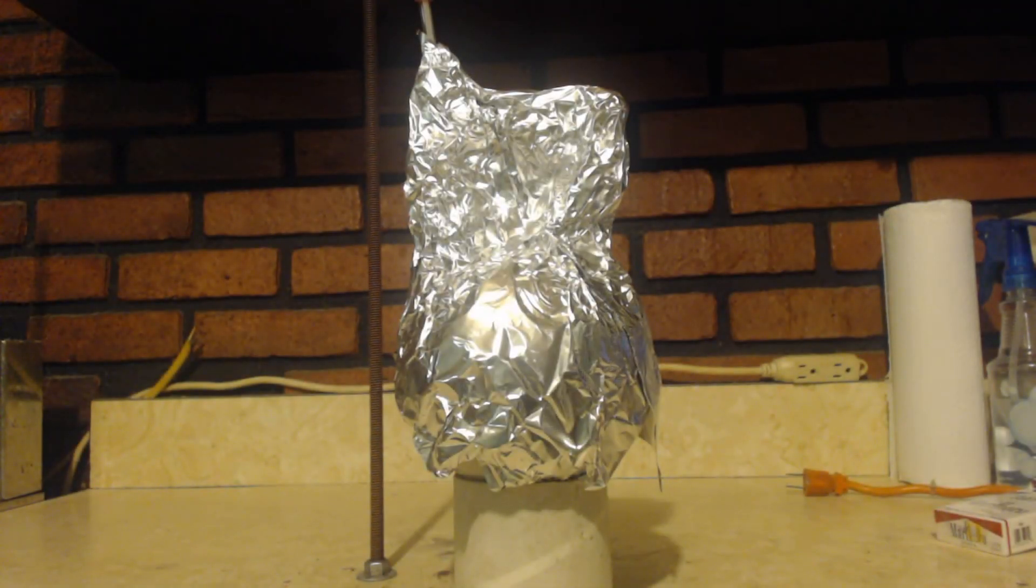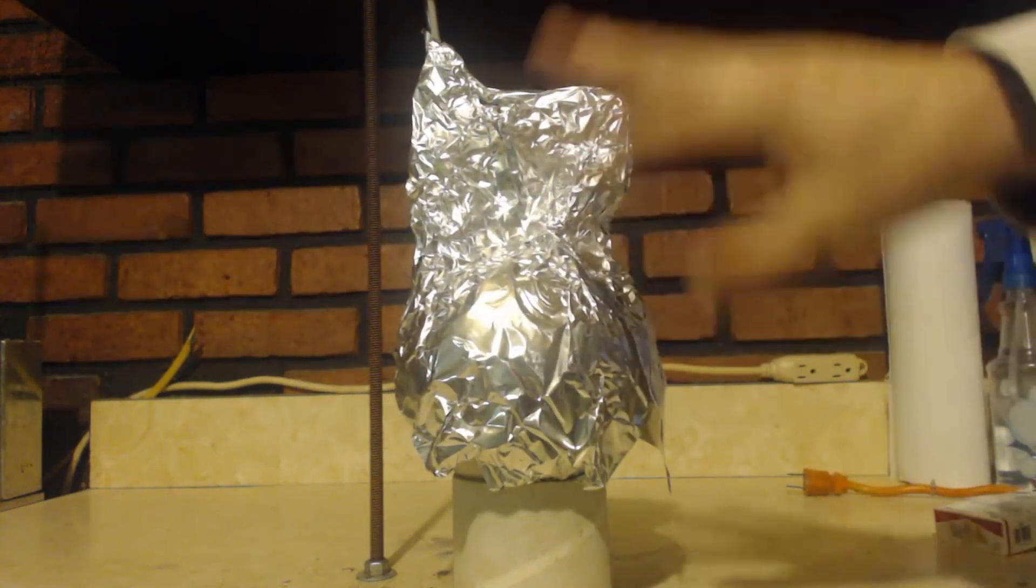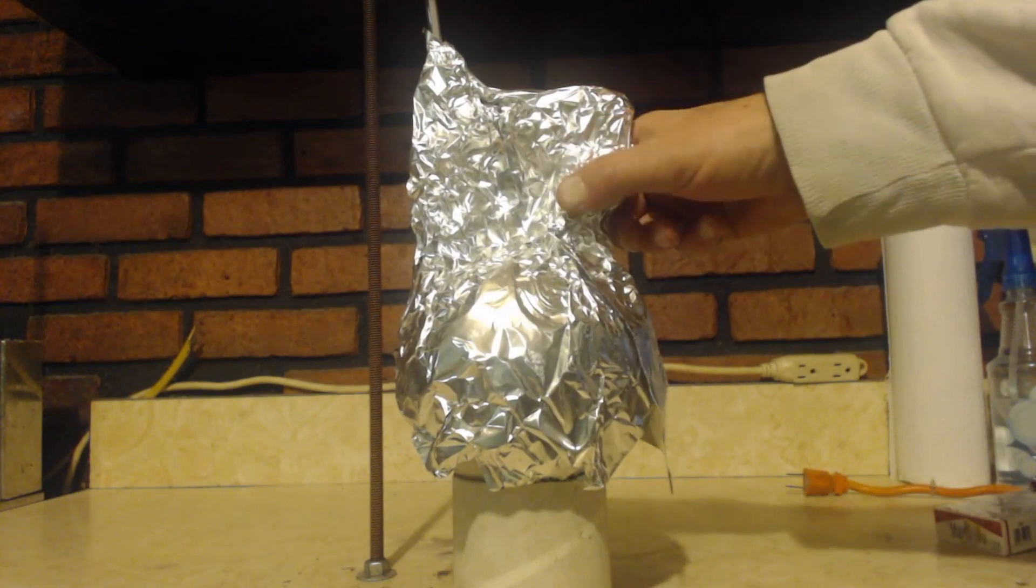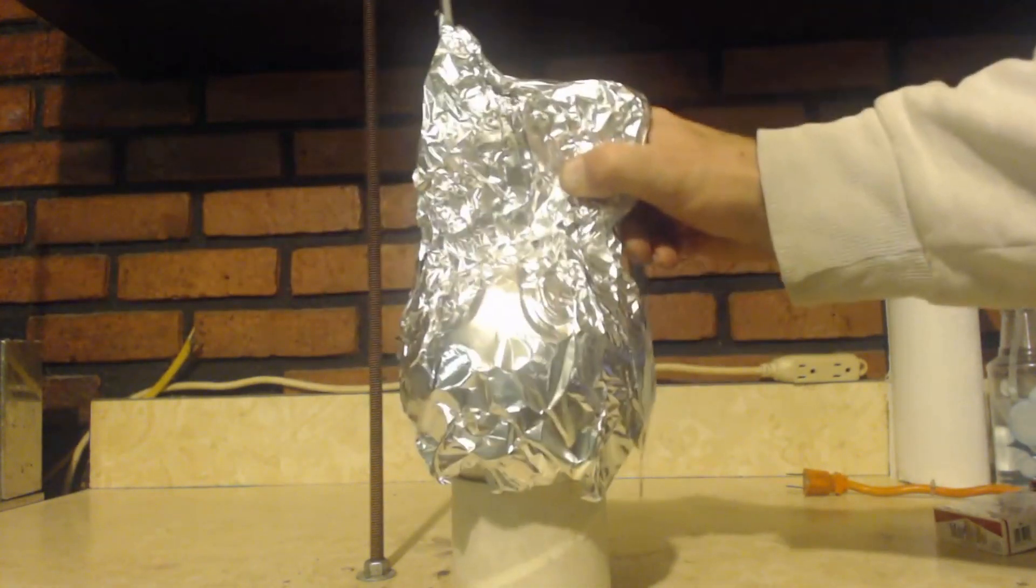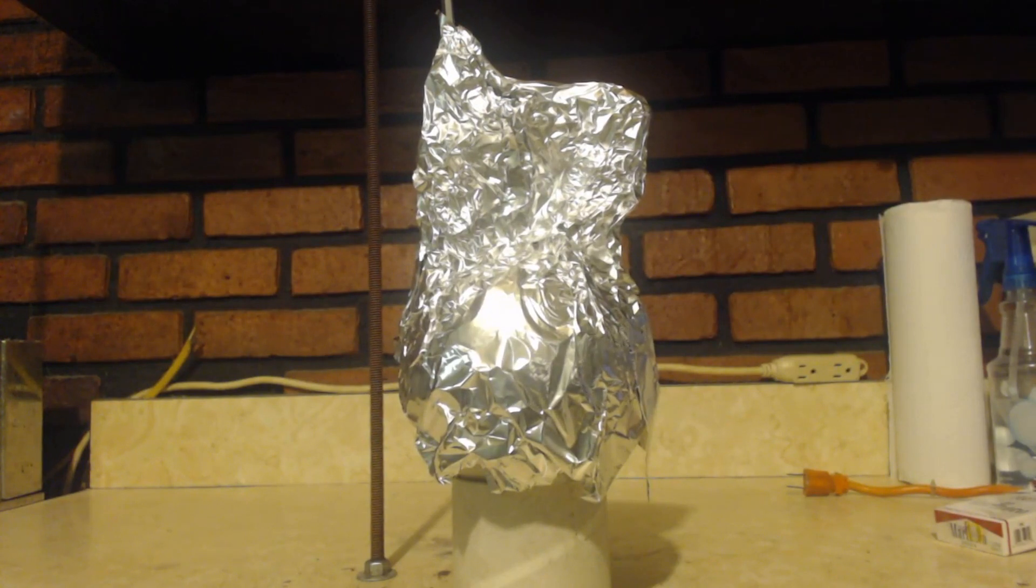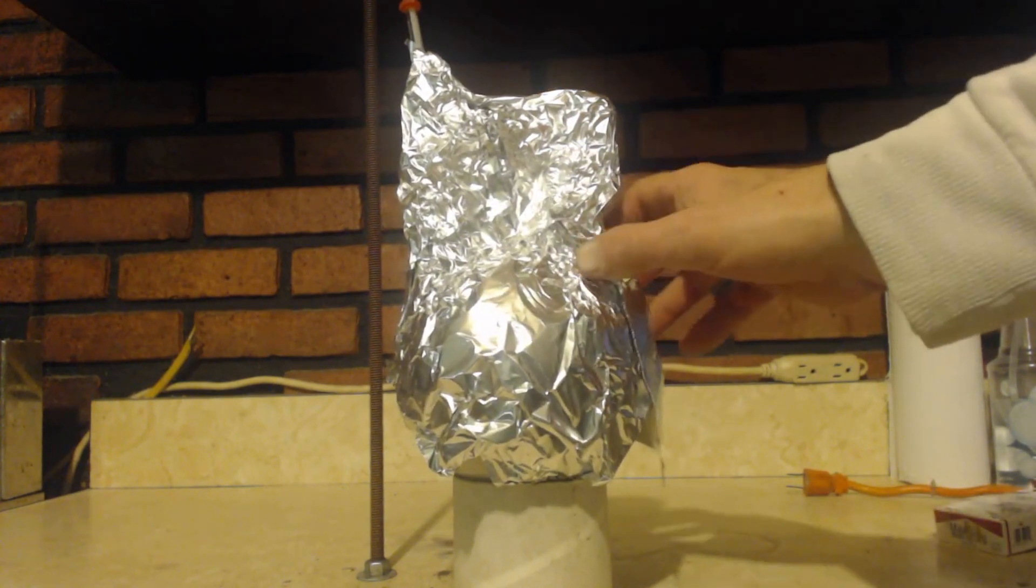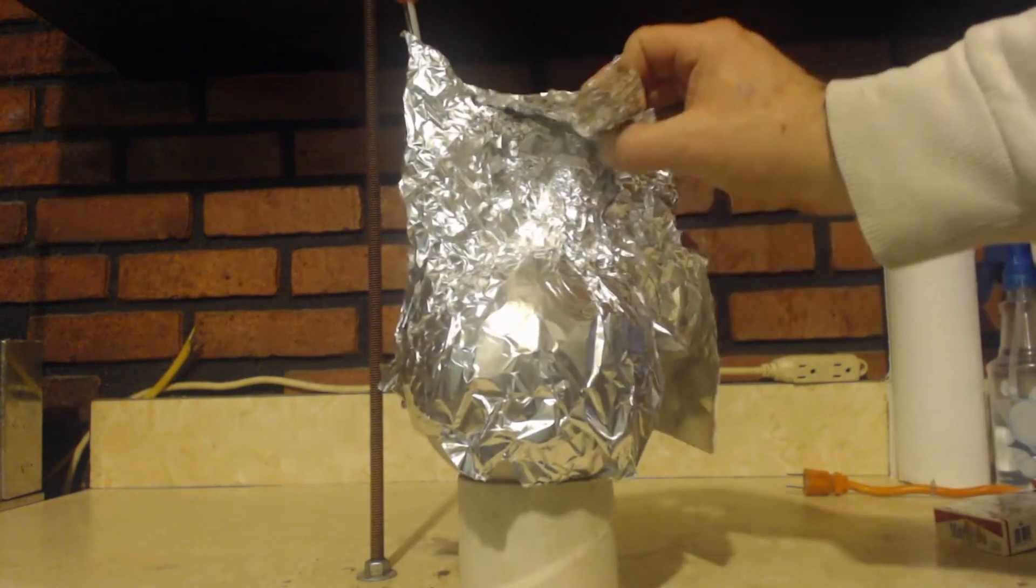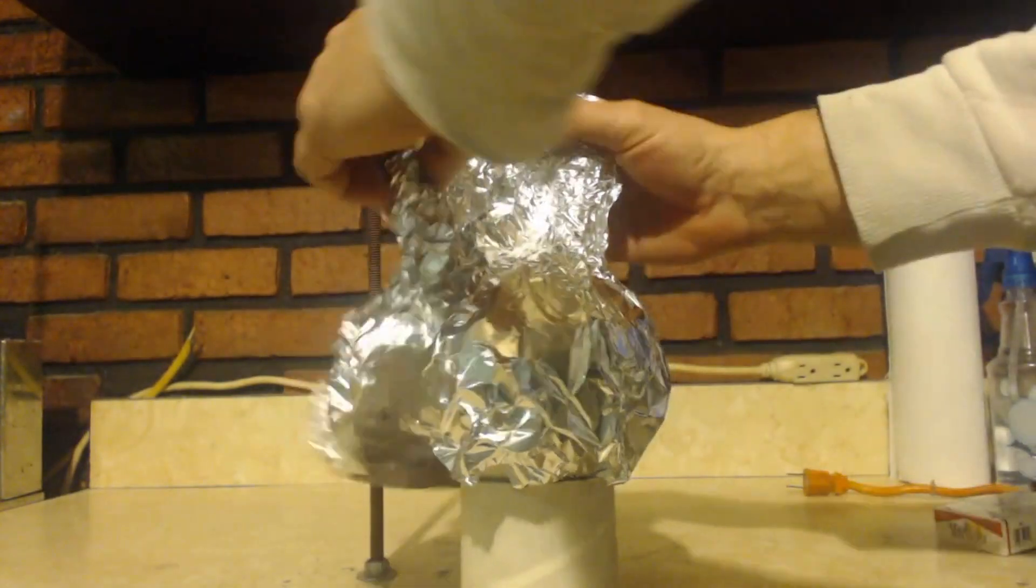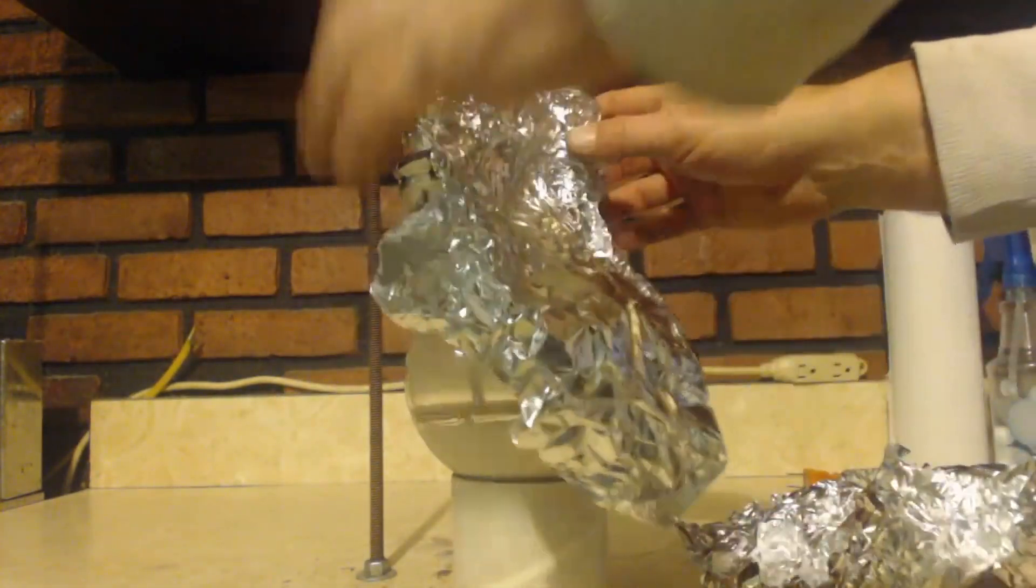So, for about six hours last night, I put this like this with the aluminum on it, because I don't want the sunlight screwing up any of my chemicals. And I just go like this for about this long. Now, I'd set it down. I only did that maybe three times an hour. Now, seven and a half hours later, everything was still yellow. So, I let this sit for eight hours while I slept, and nothing was stirred on it. I'm hoping something happened.